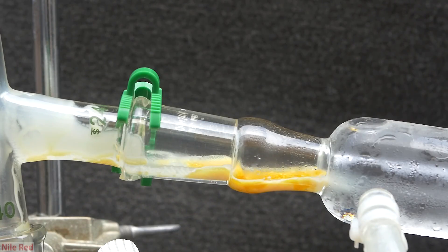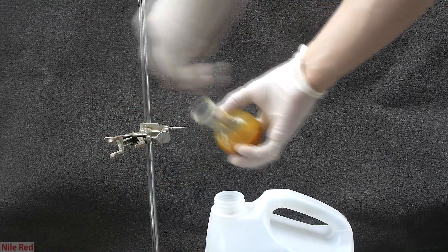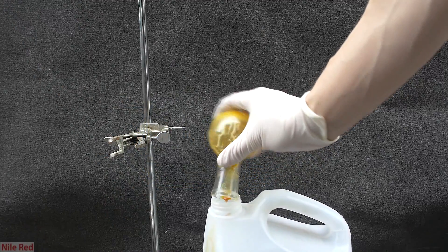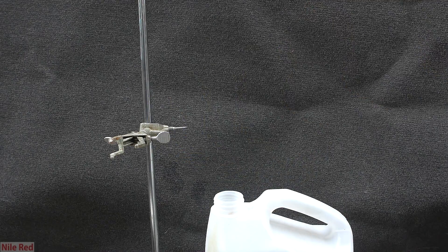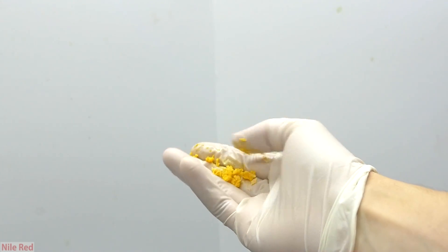When we look closer at the condenser column, we can actually see a pretty exothermic reaction happening between the sodium hydroxide and the acrolein that was still present. Anyway, the rest of the apparatus was dismantled, and the contents of the distillation flask was poured into an acrolein waste container. I scraped out the acrolein from the condenser column, and it had formed a nice hard plastic.